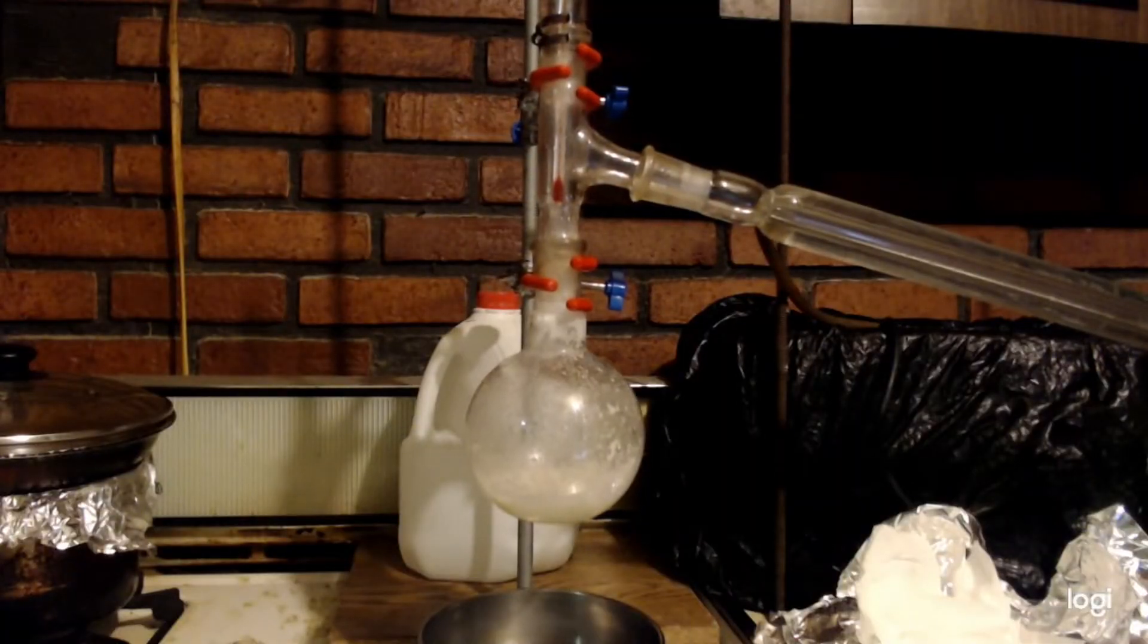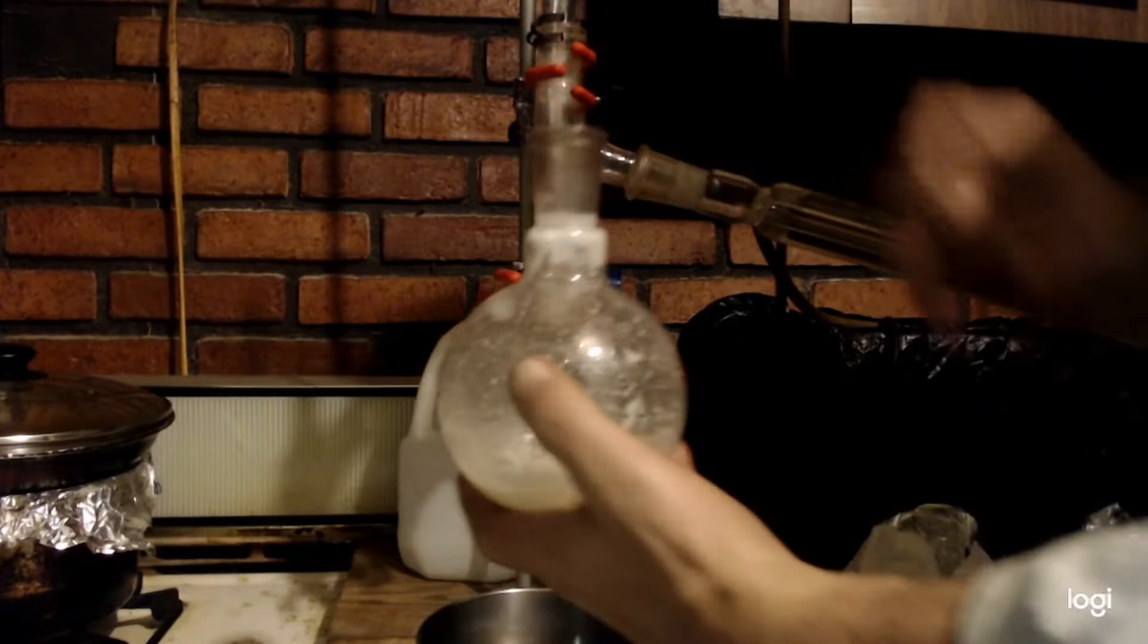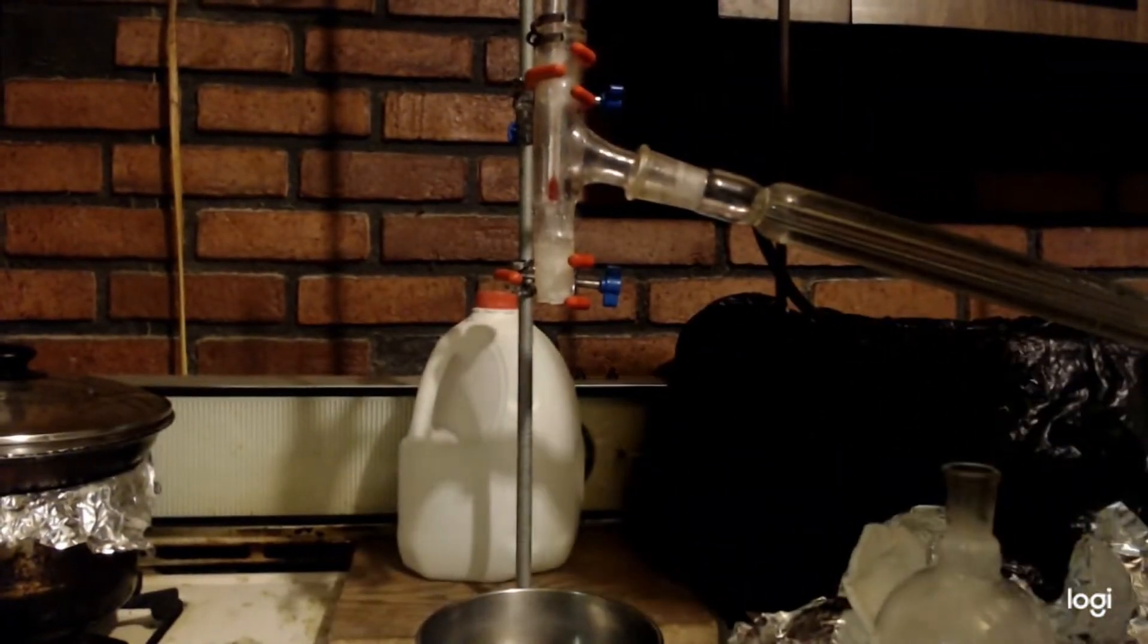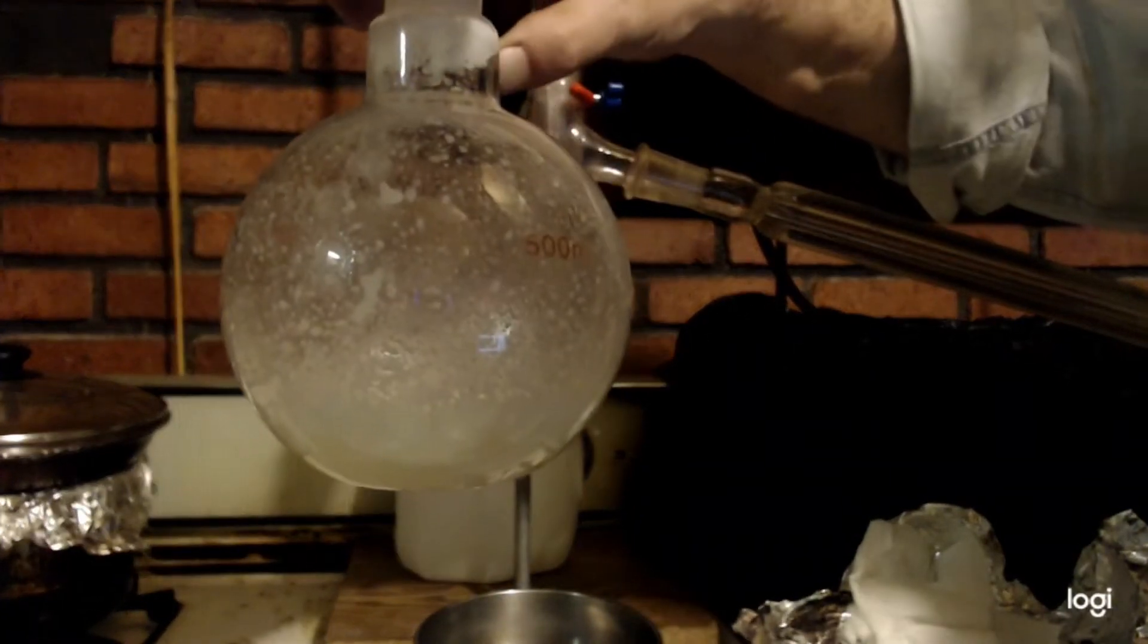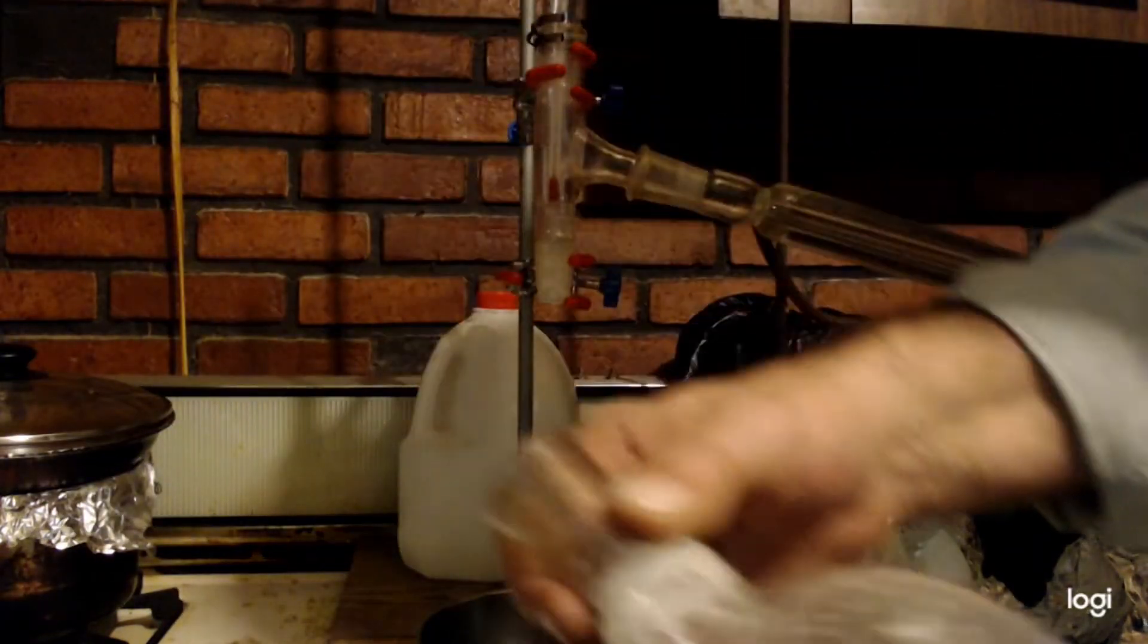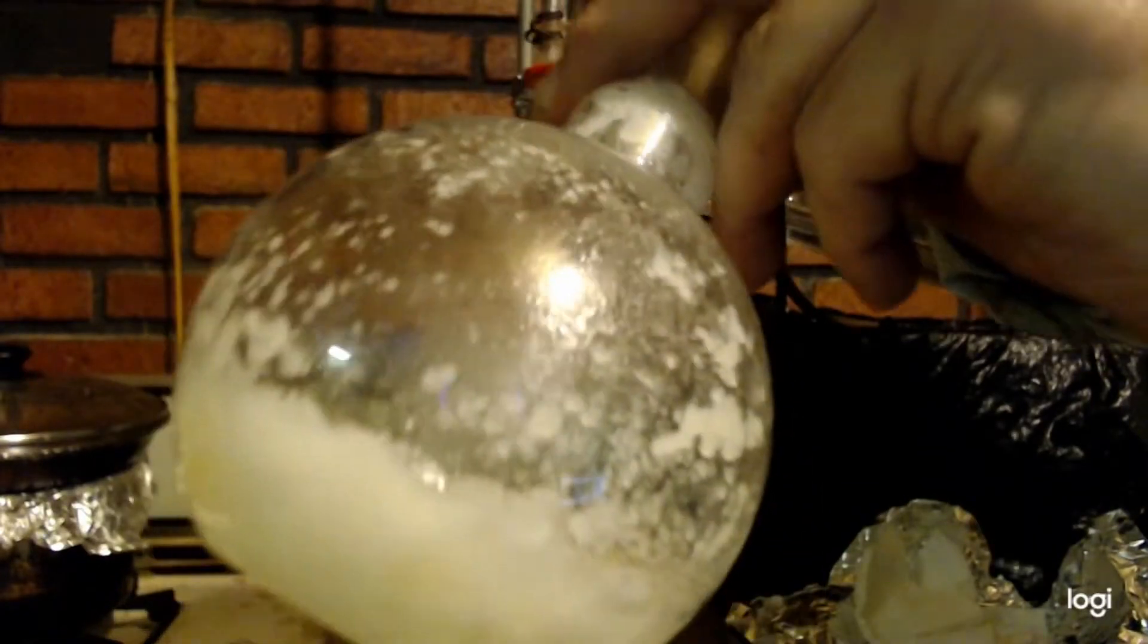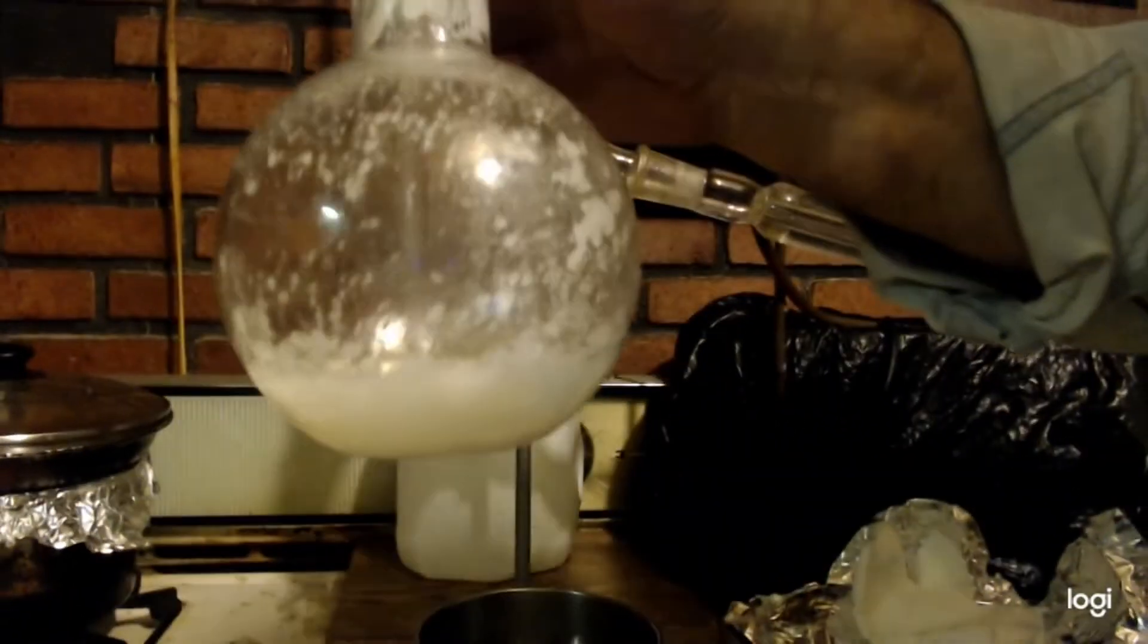Now it's not 100% dry in there, but it's taking forever. So I think what I'm going to do is just move on to the next step, which is to try to get the dimethylamine out of there. And the way I'm going to do that is I have some cold chloroform here. I'm just going to put enough in to cover it up. Now I'll get something to poke it with and stir it up a little bit. Then I'll filter that.